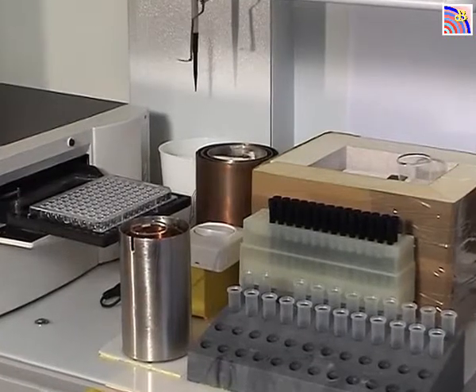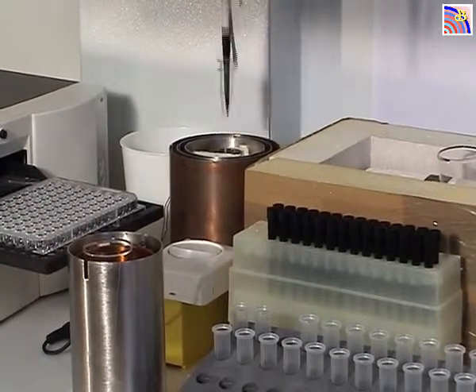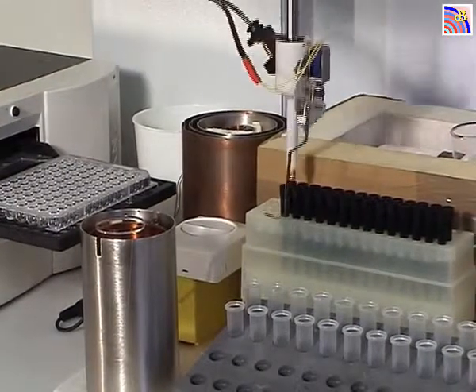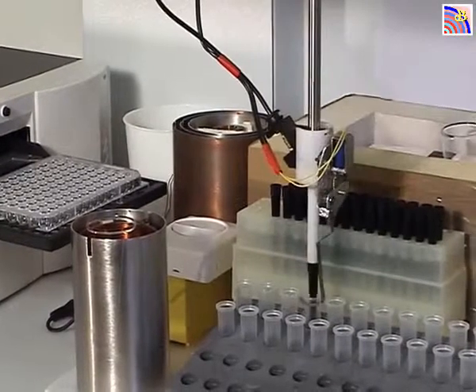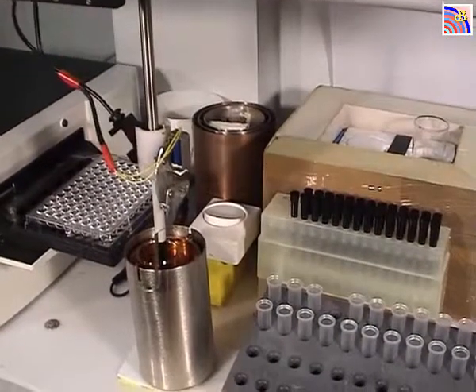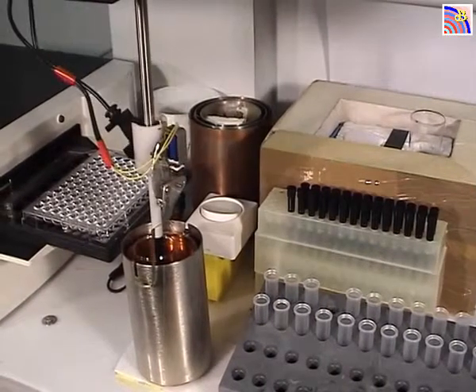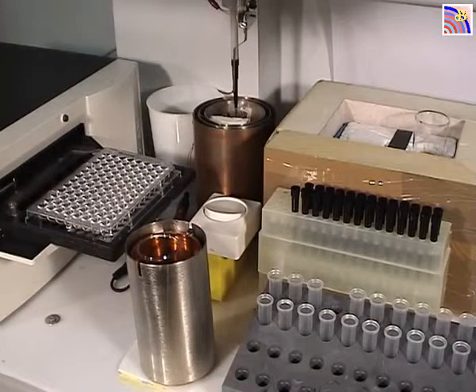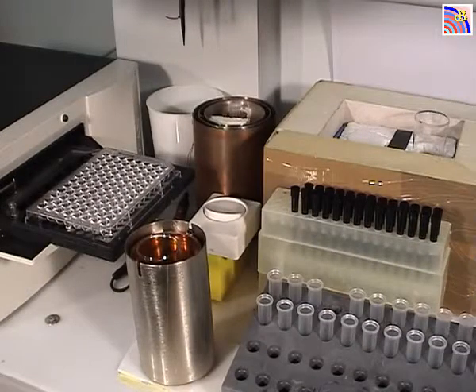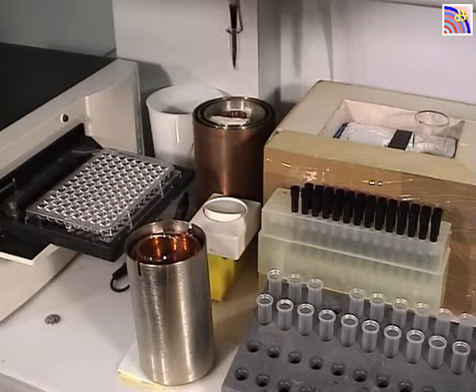Get the tube back, put it back into the third position, remove the tip, get another new tip, get the fourth tube — you see that this machine is very clever. Now the water knows exactly what to do. Now 4 signals have been played: there are 2 water signals and 2 heparin signals that are coded, so the operator and the machine don't know which is which.